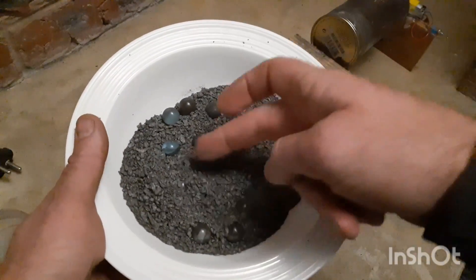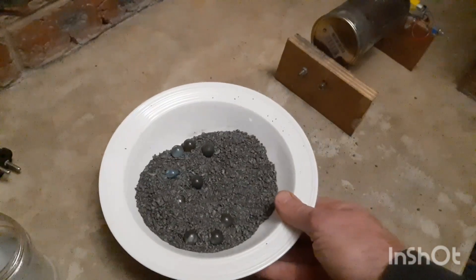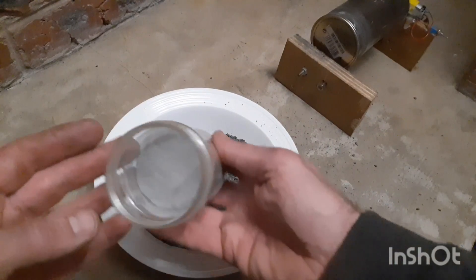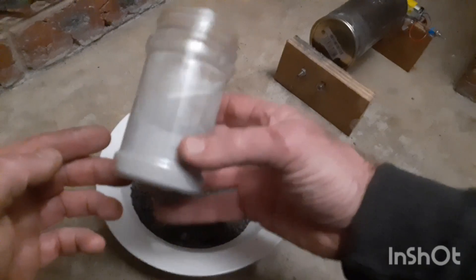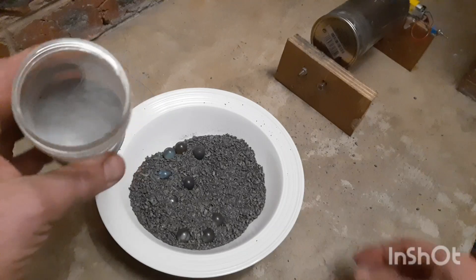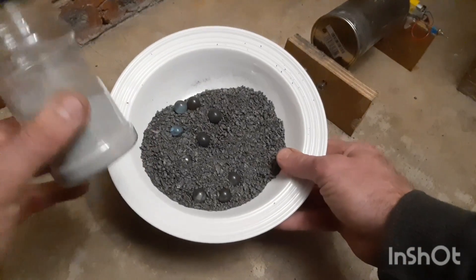I know it has a lot more time to go, but I was looking around my garage and found some aluminium powder that I bought a while ago from a lab. The lab aluminium looks lighter in colour — I'm not sure why — but my excitement was too much and I decided to use the lab aluminium. Not that it would be better, as I've seen how tin foil works just as well in other YouTube videos.